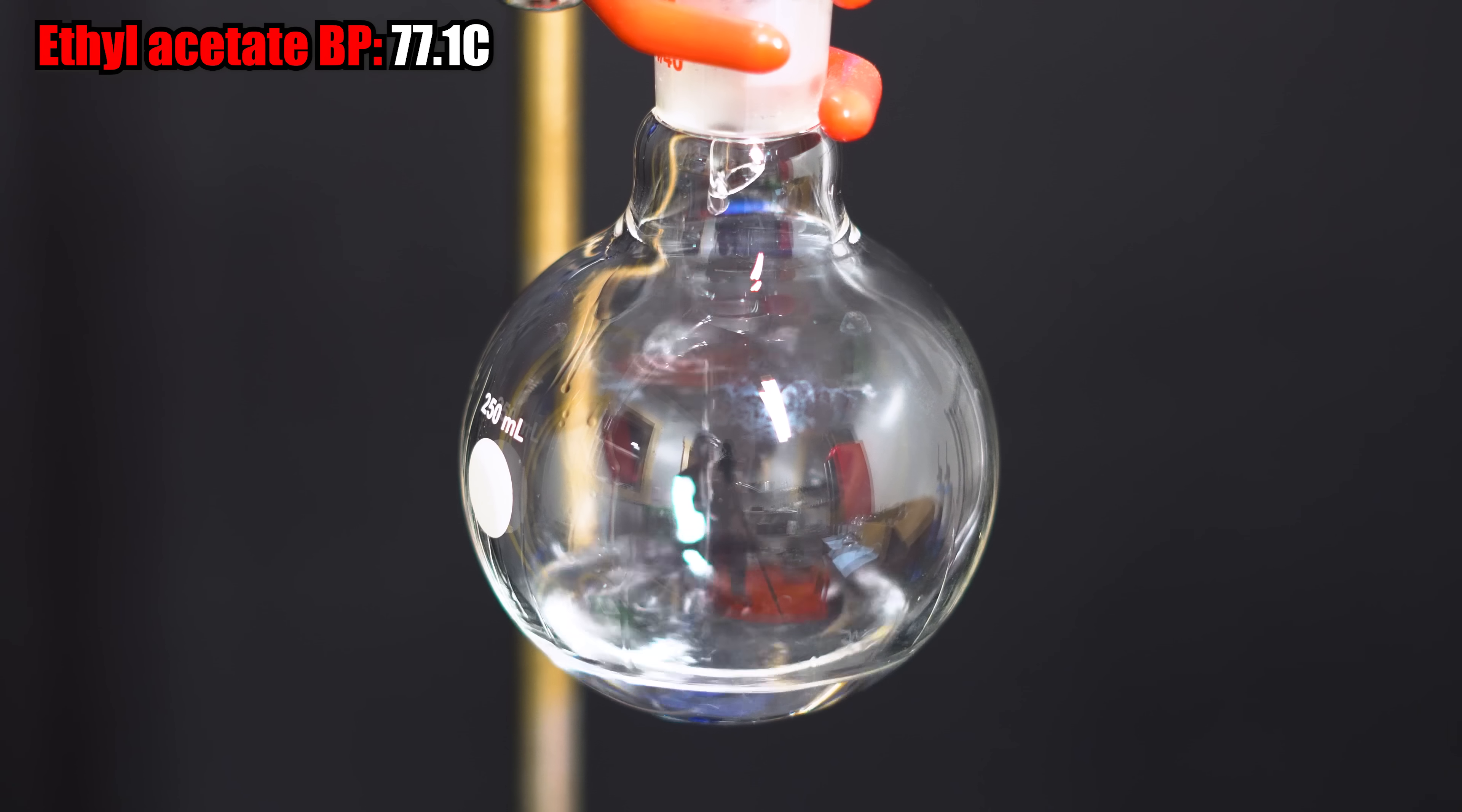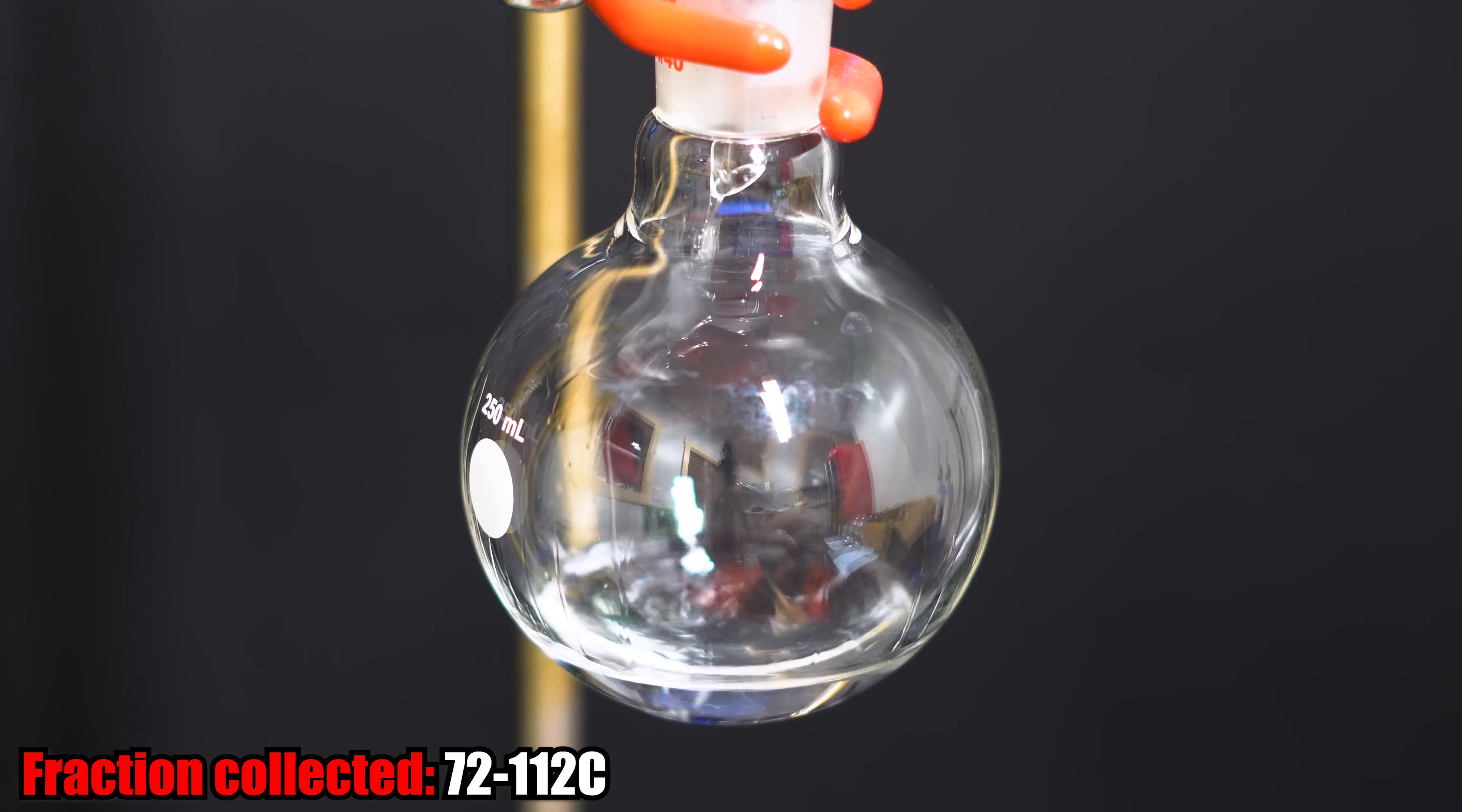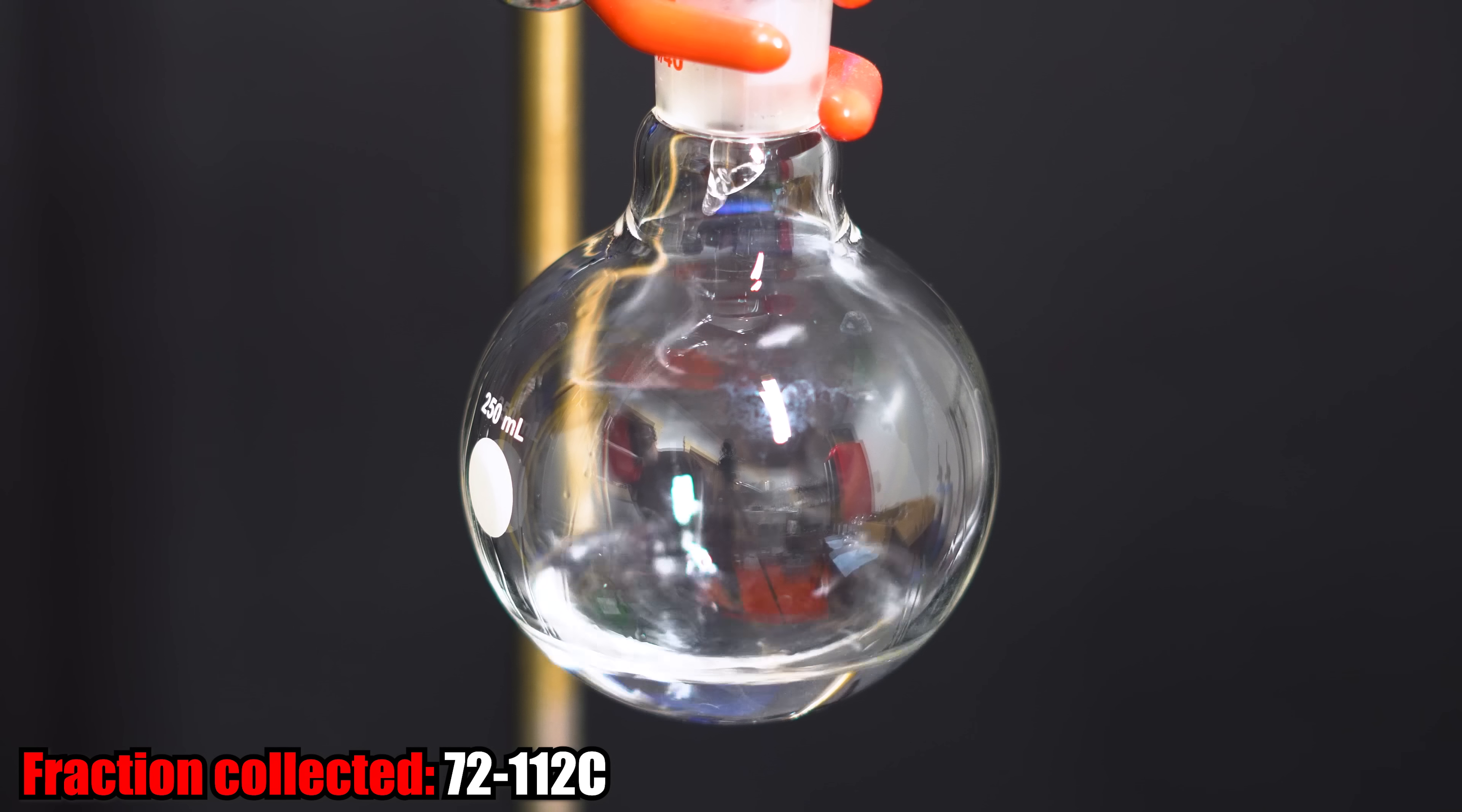I decided to collect everything up to about 70-72 degrees Celsius, and then switch the flask out so we can collect the ethyl acetate. Though, likely, we're going to have a mixture of ethyl formate and ethyl acetate. I switched the flask out just so I could have a pretty pure product of the ethyl formate, and I really don't care about this middle fraction. I'm just going to pour this back into the bottle since it's going to be a mixture of things, and I'll just fractionally distill again.